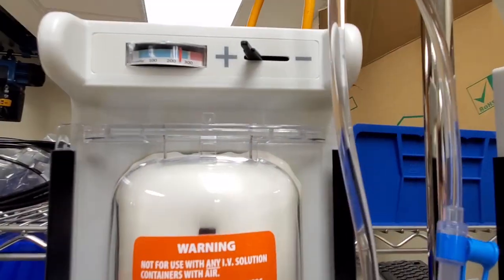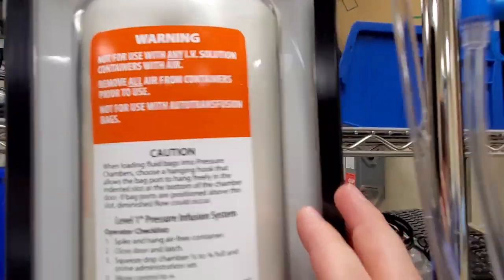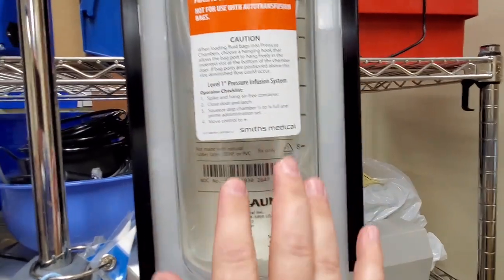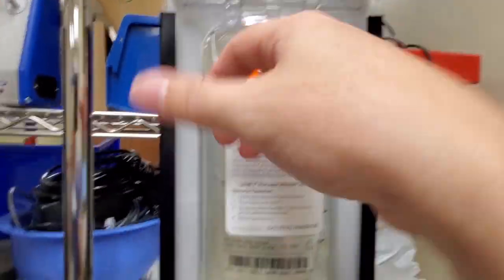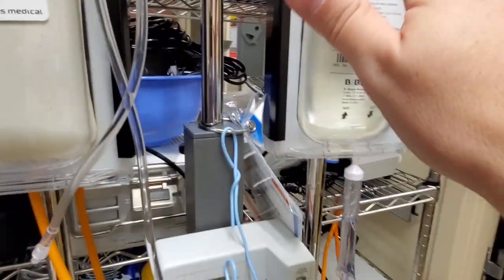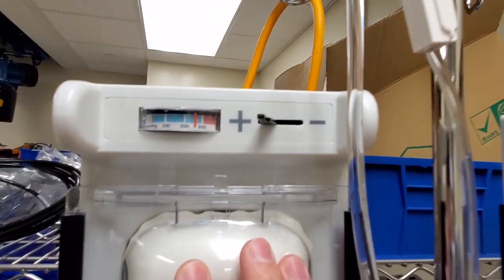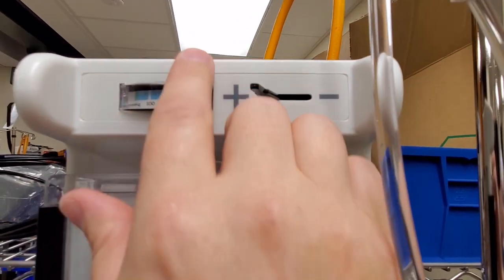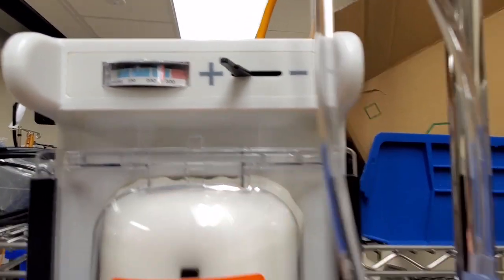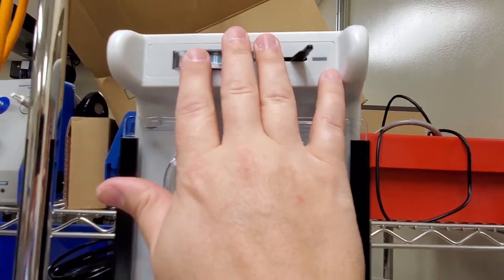Okay guys, you can see right here I've got it on the plus. I'm pressurizing the bladder which normally would be squeezing on my saline bag, and this goes really quickly by the way. When you activate the pressure and start squeezing, it will empty that bag in seconds. So here I've got one. You can see it's up to about 260 millimeters of mercury and that's one of the checks that we do. We'll go into that in just a moment. But we check to make sure that these don't have leaks.